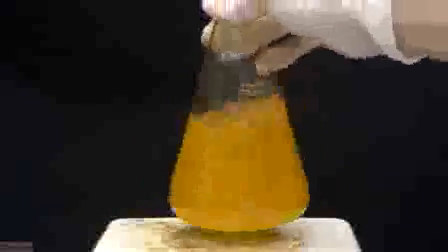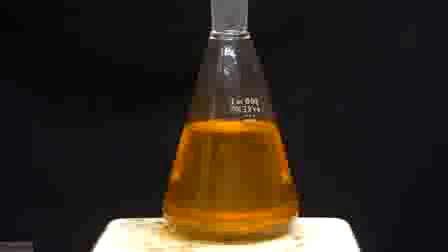When I was done filtering, I looked at my filtrate and I can see that it's cloudy because things have already started to precipitate. Things cooled down quickly and kind of just crashed out, so the crystals that formed aren't very nice, and what we want to do is heat things up again, redissolve everything, and let it cool down slowly so it can form some nice crystals. So it's heated up on a hot plate until everything is dissolved, and then I leave it out to cool down. I left it out overnight, and in the morning we can see that some nice crystals have formed.